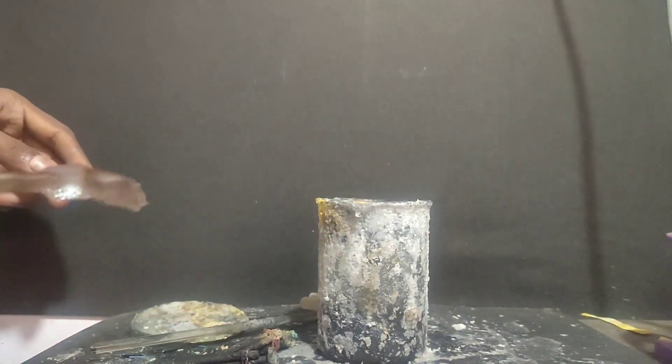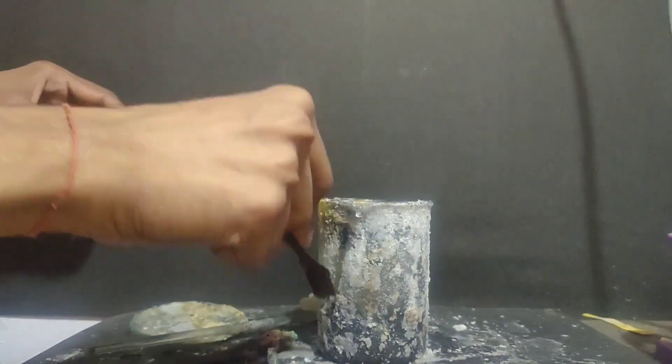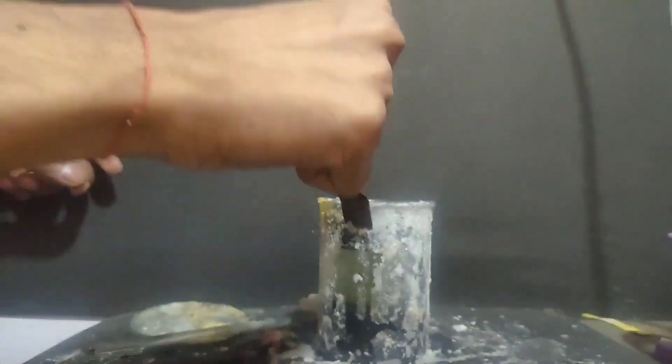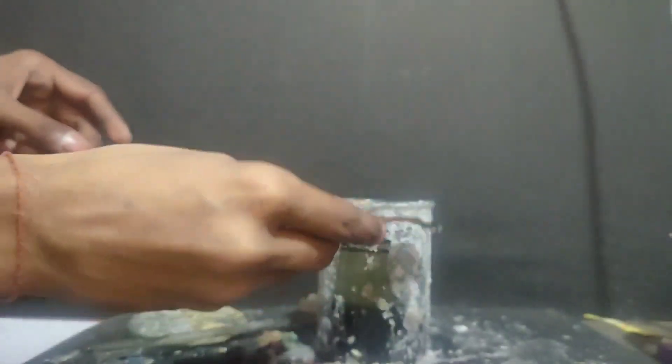After the 10th day I took off the electrodes and cleaned the beaker, first by scraping off the salt from the beaker and then by washing it with water.